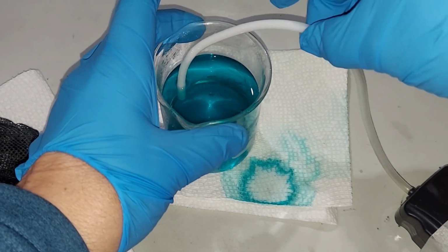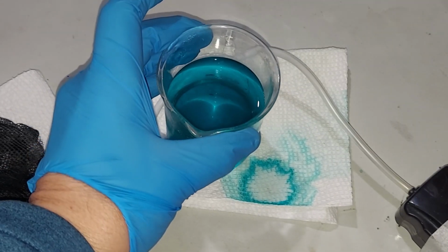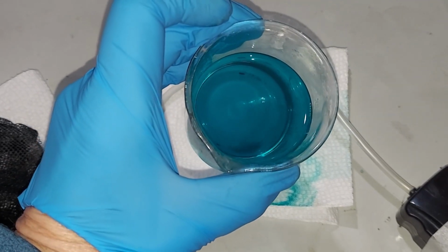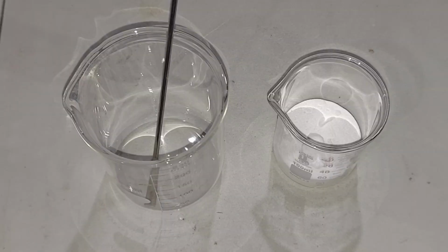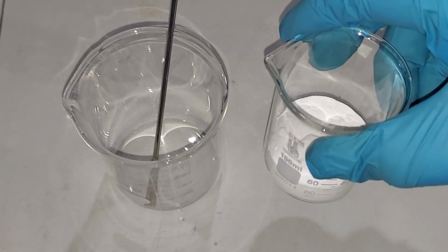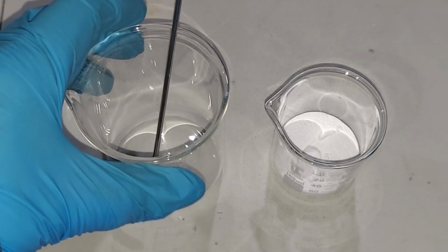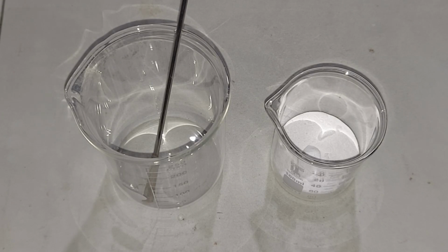At this point, I would have expected all of the copper ions to have mixed with the acetate so that most of what's in here would be copper acetate. Here's my sodium carbonate. The solubility of this in water, as we discussed, is about 1/4 gram per milliliter. So I'm going to use 250 milliliters here, which will equal the amount of the copper acetate that I have there.